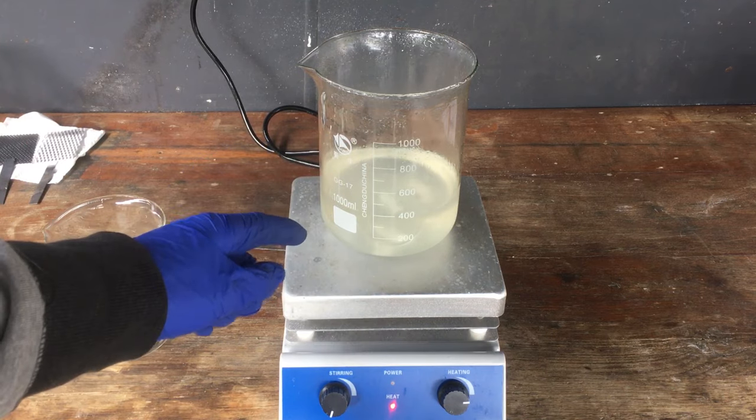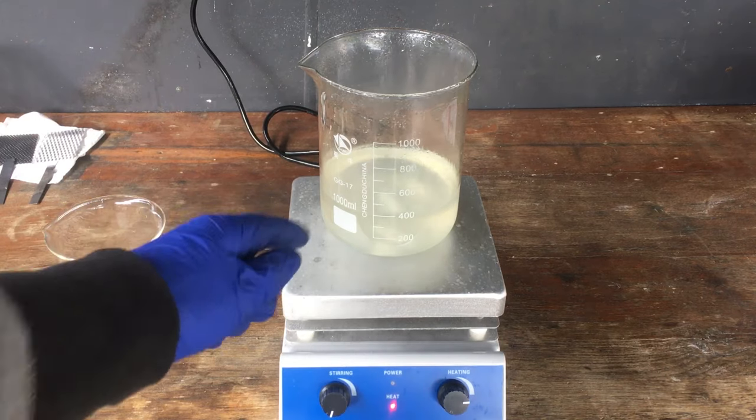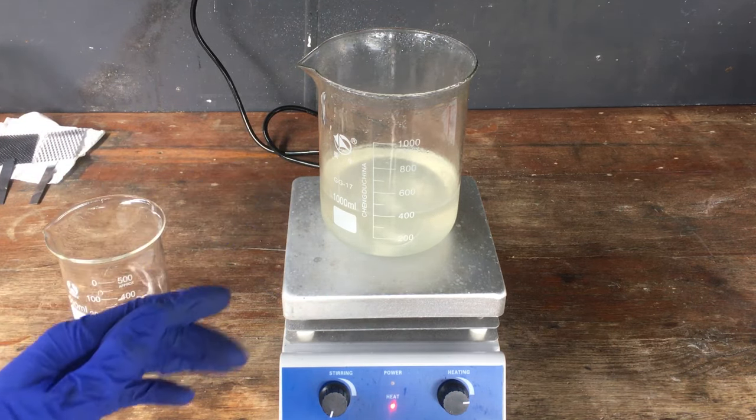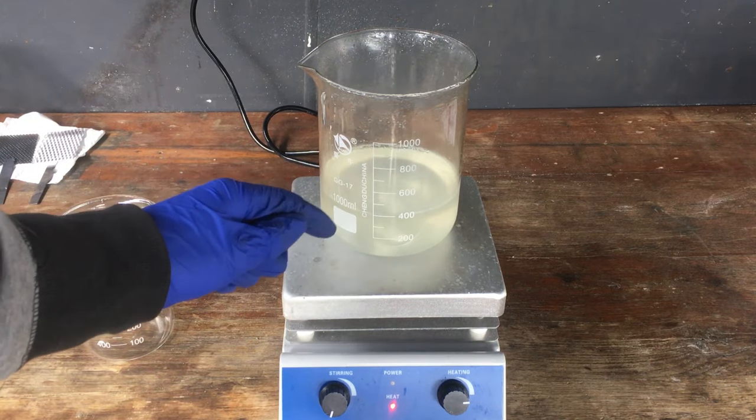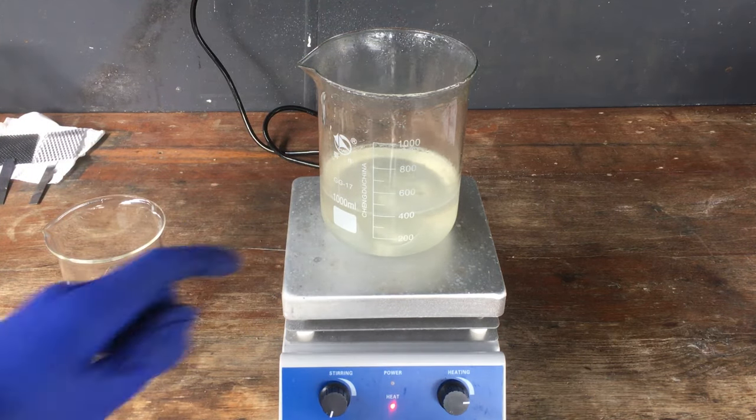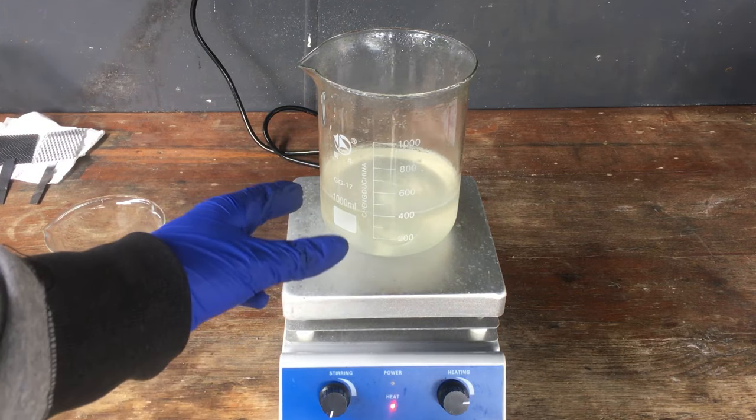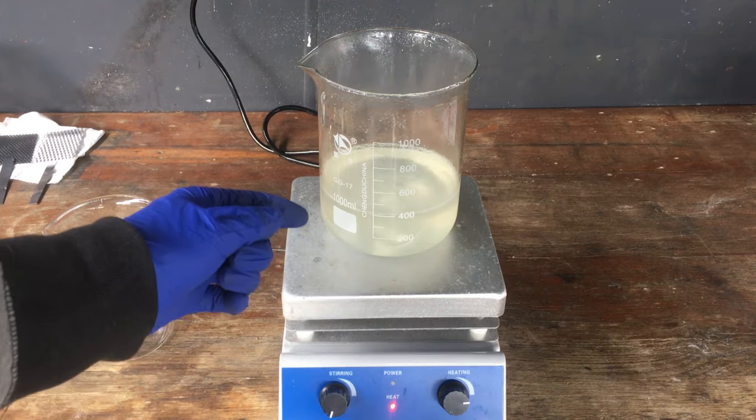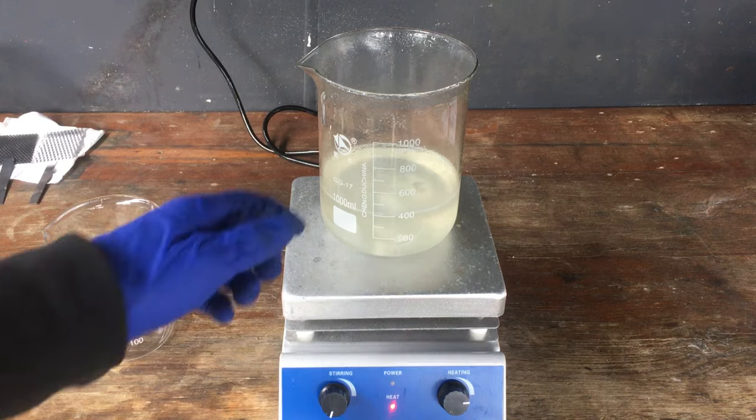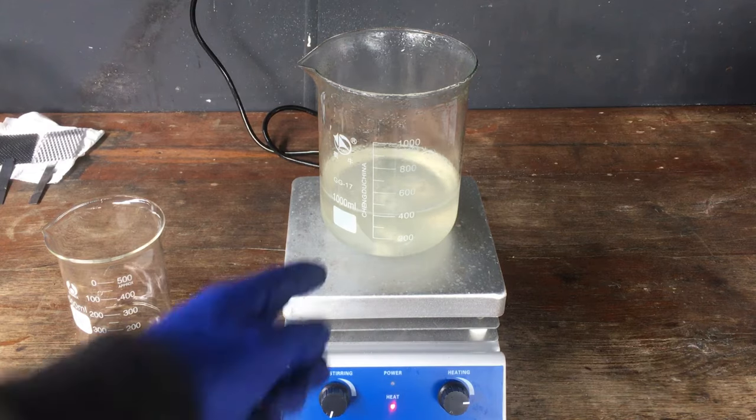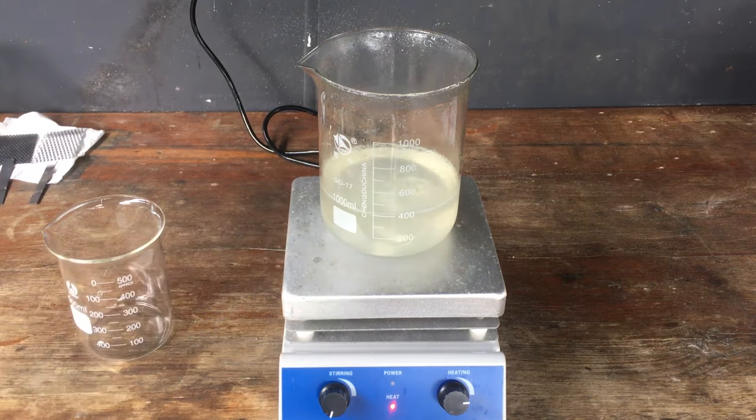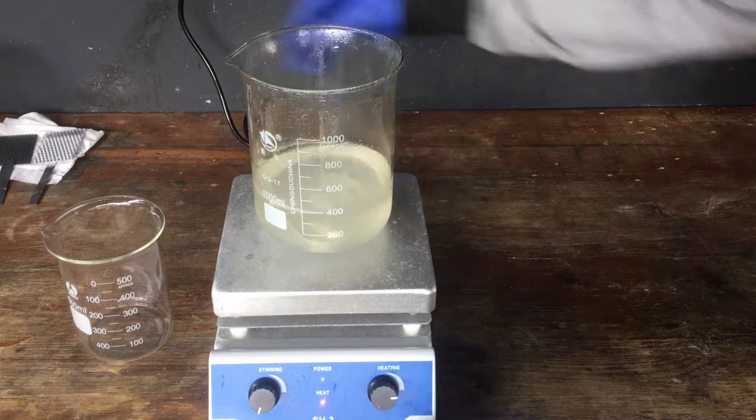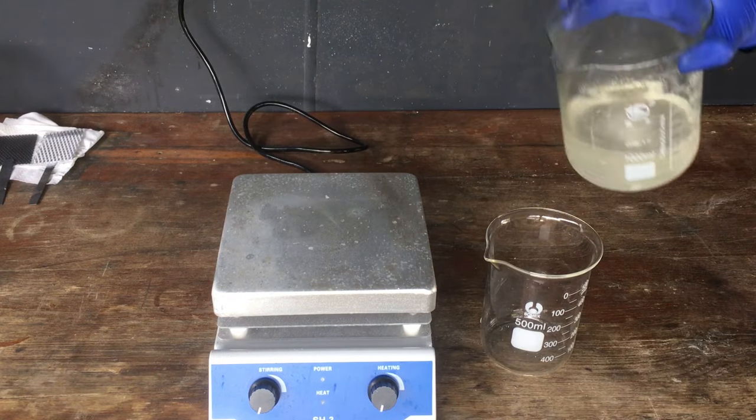Now you're probably wondering why we aren't just boiling this down as far as we can and getting it to the point where the sodium chlorate actually starts to crystallize out of solution due to the low volume. The reason we're not going all that way is because when we're working with something that's got a steep solubility curve, like sodium chlorate, if we boiled it down to, say, 250 milliliters, which we probably could without anything crystallizing out, once we cool down the solution, generally the amount of crystals that we get, or the volume of crystals, would actually be comparable to the volume of solution that we had. So it'd be very difficult to separate the crystals from the leftover solution. If we start with a larger volume, like 350, 375 milliliters, as we have now, it's much easier to decant off our leftover solution after crystallization. Anyway, we're just about ready to start cooling it down and crystallizing out our product. So I'm going to turn this off and pour everything into another beaker.